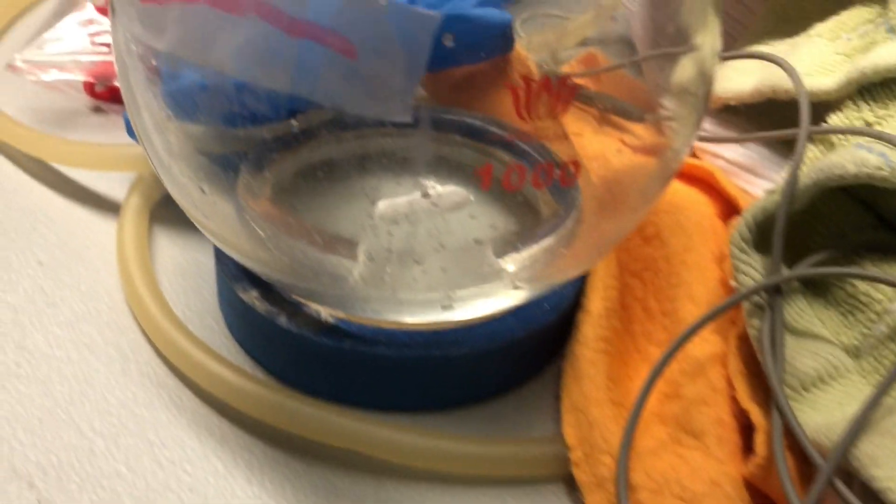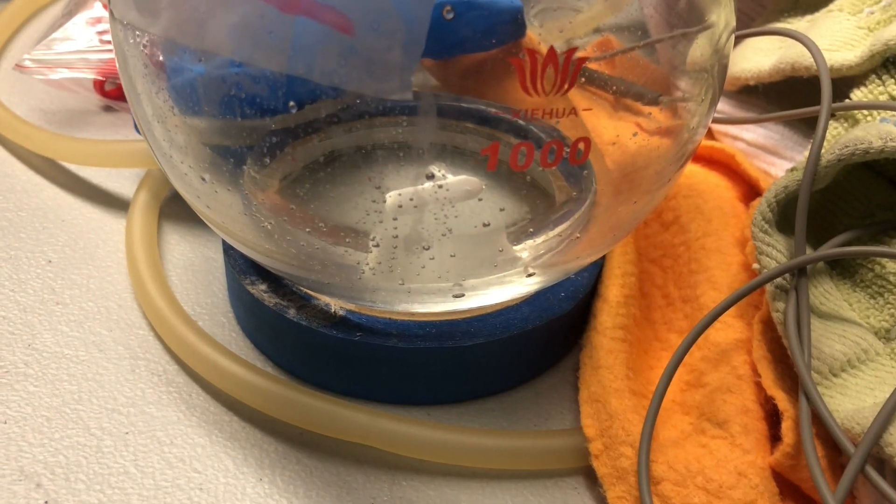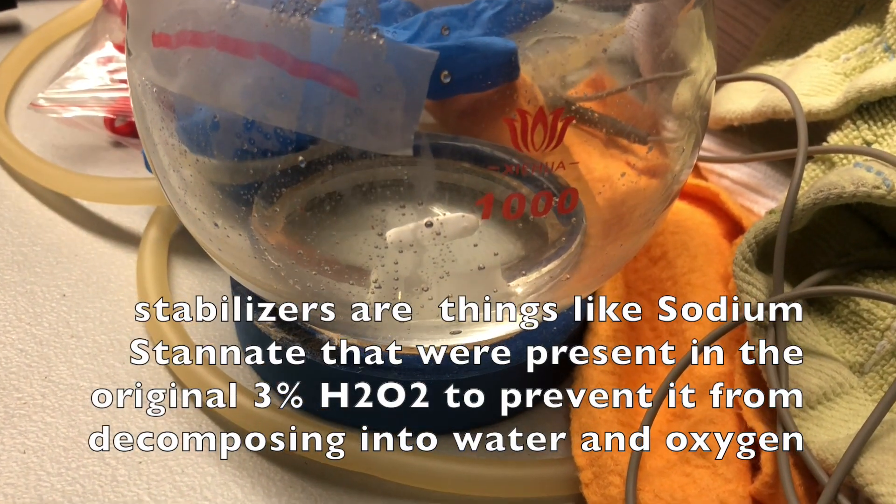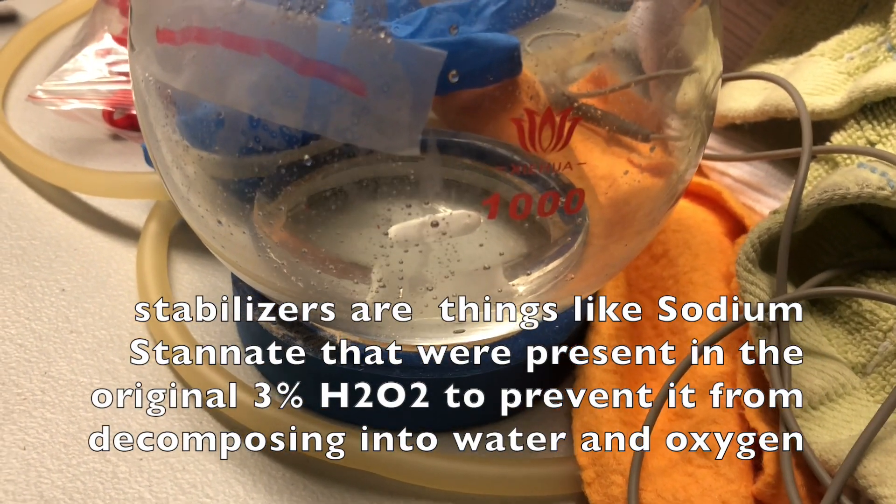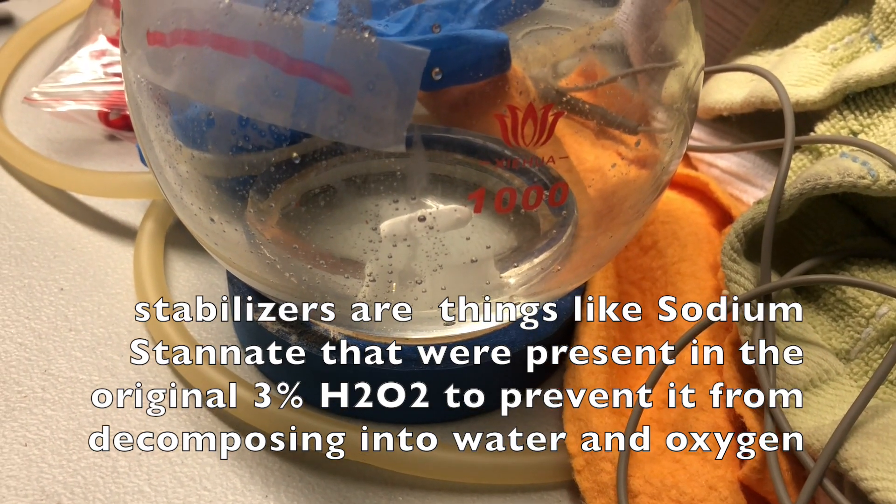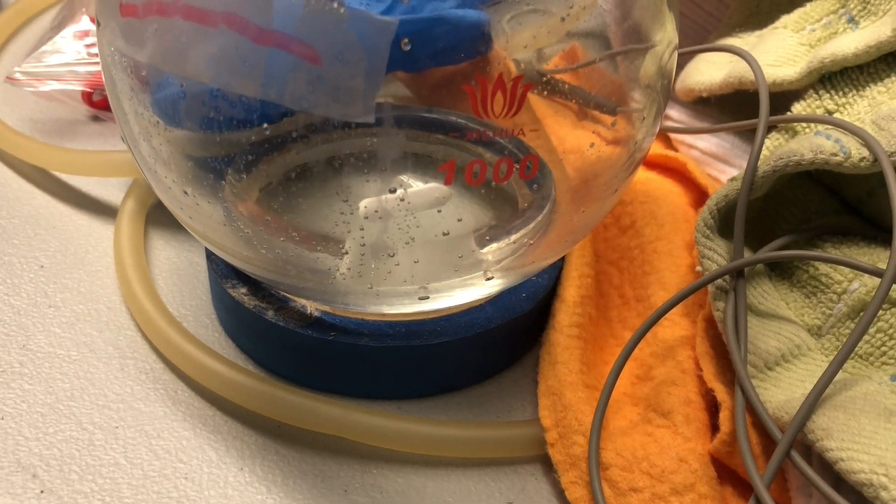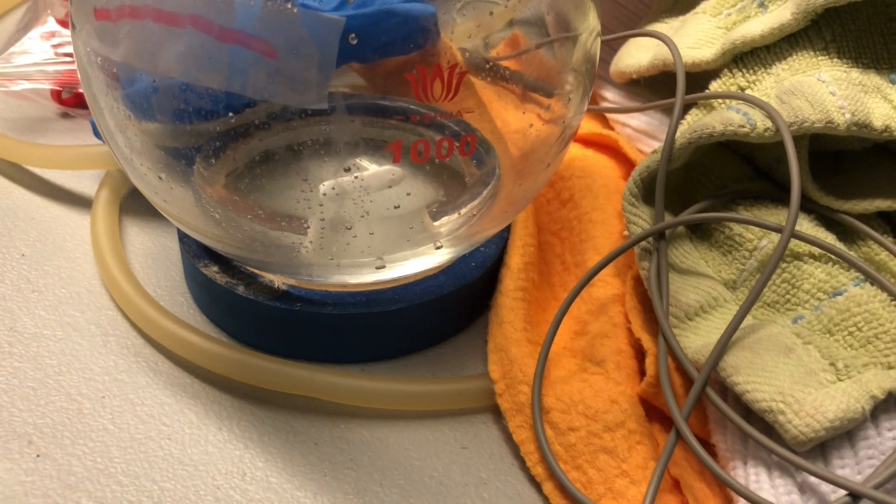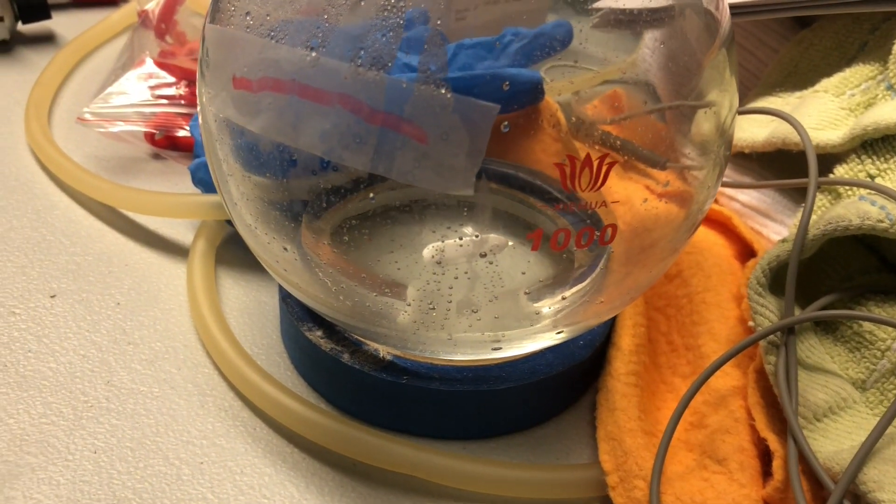Next steps. There are a lot of stabilizers in here. Stuff that helps prevent H2O2 from becoming H2O. So I could distill it or think about how to filter it out. But I haven't thought about that too much.